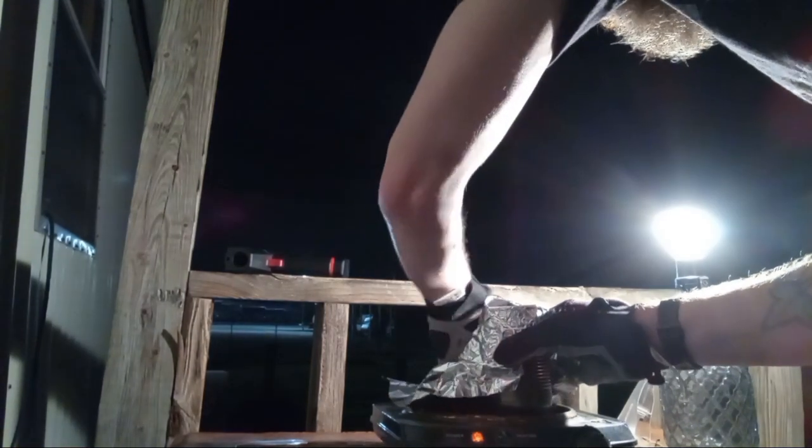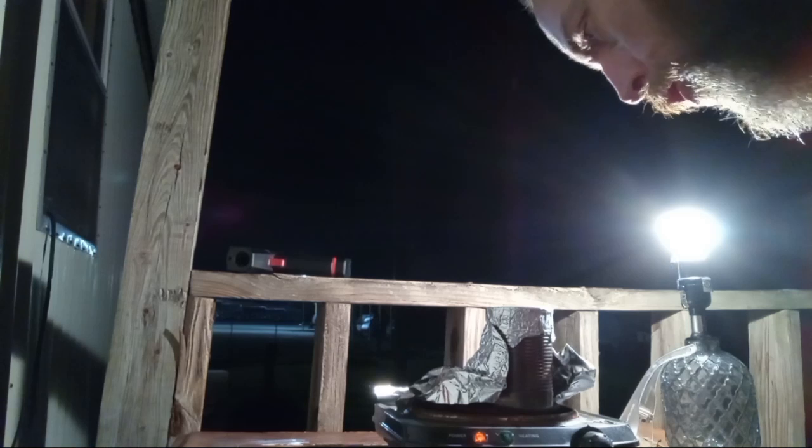But we should be able to get a pretty good coverage here. And yeah, I've gone through several of these hot plates. They're $15 at Walmart. I have absolutely destroyed some. I had a huge overflow making nitric acid a couple weeks ago, and I am shocked that this thing still works. But here we go. I will include the temperatures in the reaction scheme still and all that stuff.